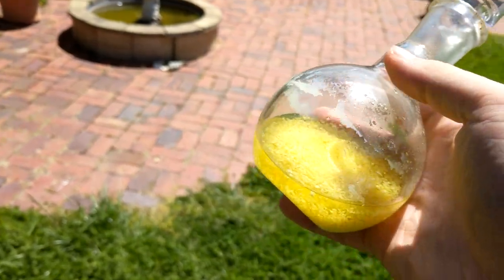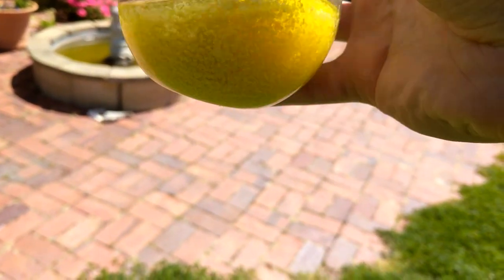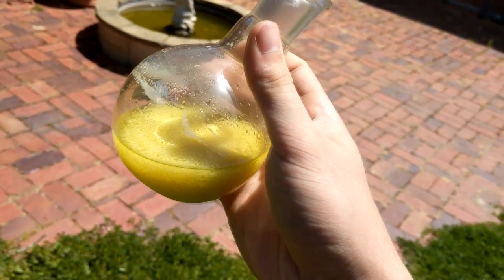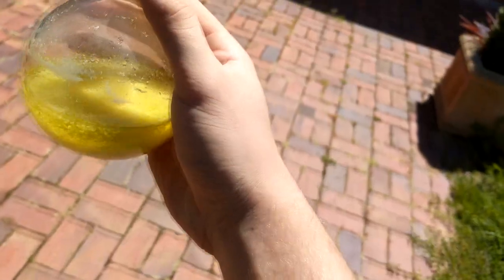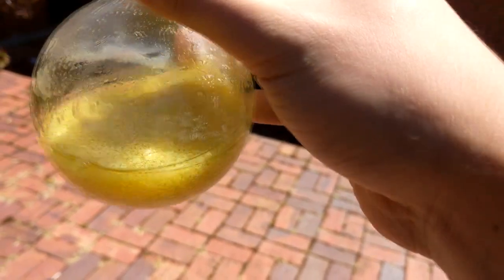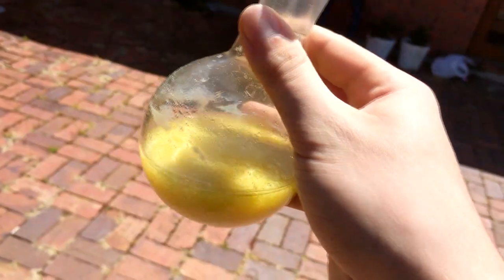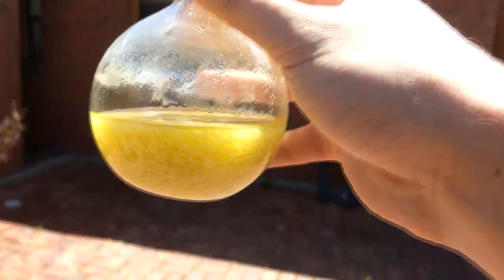I didn't even get to cooling it down — I'm at labs there and there are fridges in the building, but halfway there I looked down and it was full of crystals. I was right about the supersaturation. I was really hoping to get it on camera — it would have been a really nice shot. I tried with a previous shot: it looked really like a thick solution so I thought it was supersaturated, I was shaking it but nothing happened. As soon as I turned the camera off and walked it over there — it crystallized. I can't be too mad because it's definitely worked. It's yet to be seen that it's actually the product, but it's hard to believe that an inorganic salt like sodium nitrate or sodium sulfate could do what that does because they just don't tend to form supersaturated solutions of this magnitude. I'm still going to put it in the fridge for a few hours — there's still more to come out of solution, but there's definitely product there.